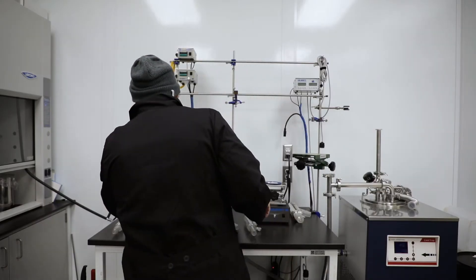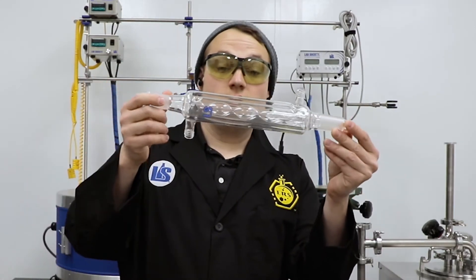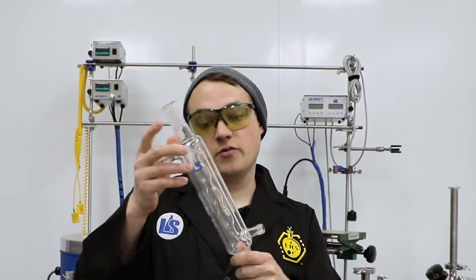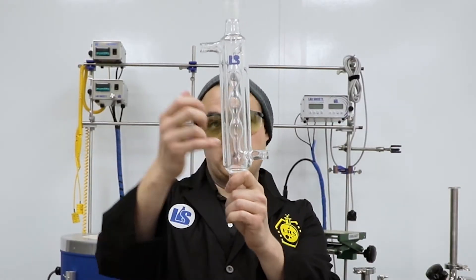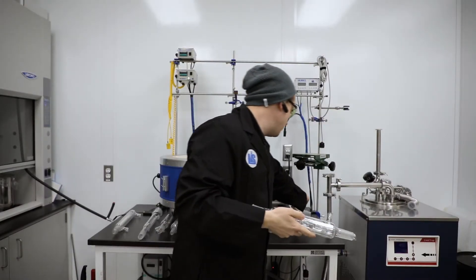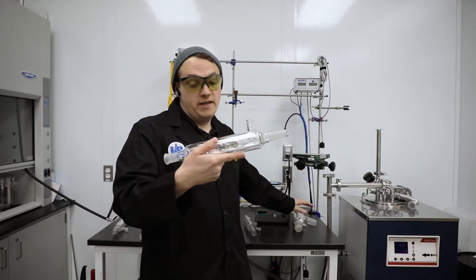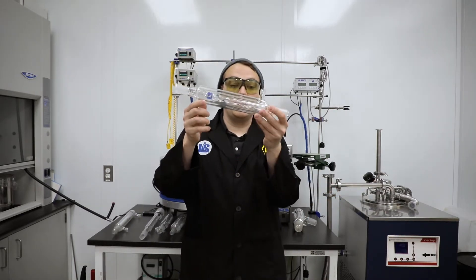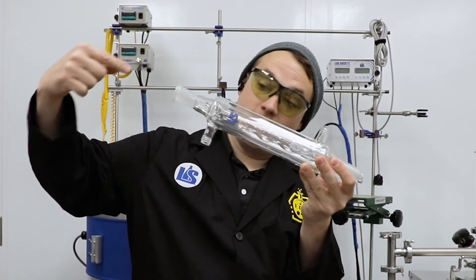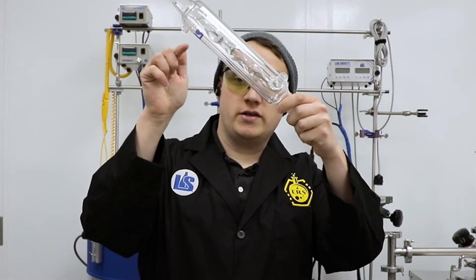In that case we might want to up the surface area, so we might go to something more like an Allen style high efficiency condenser. We sell an array of different sizes of these. They're really cool because you can run them vertically — they have a drip tip at the bottom — or you can run them kind of on an angle right off your distillation head if you wanted to.